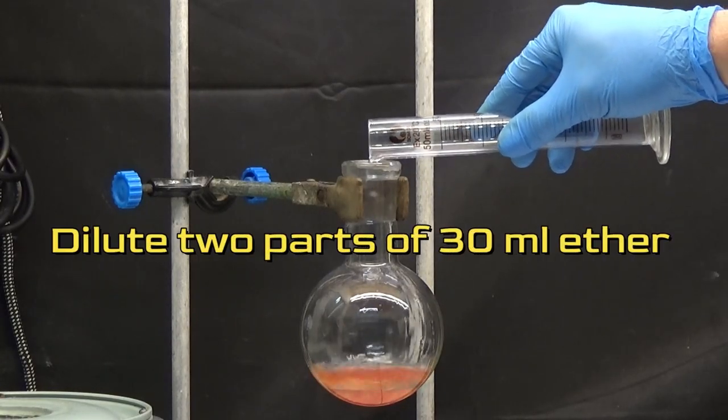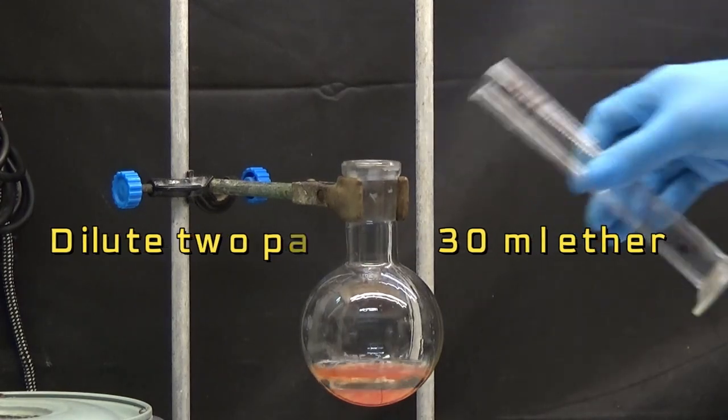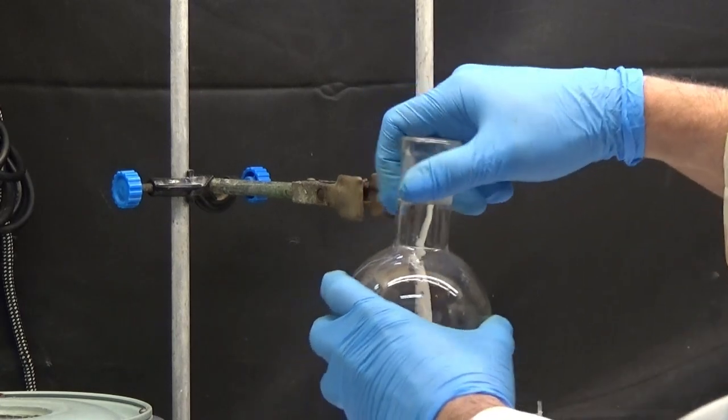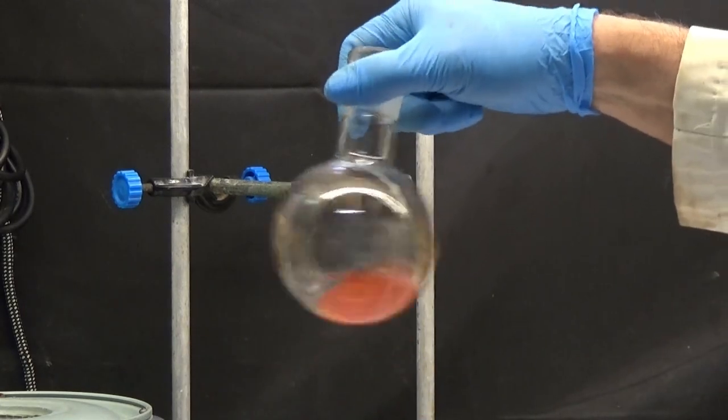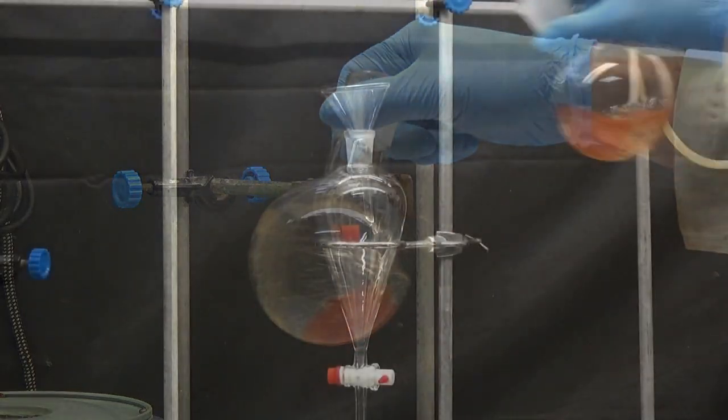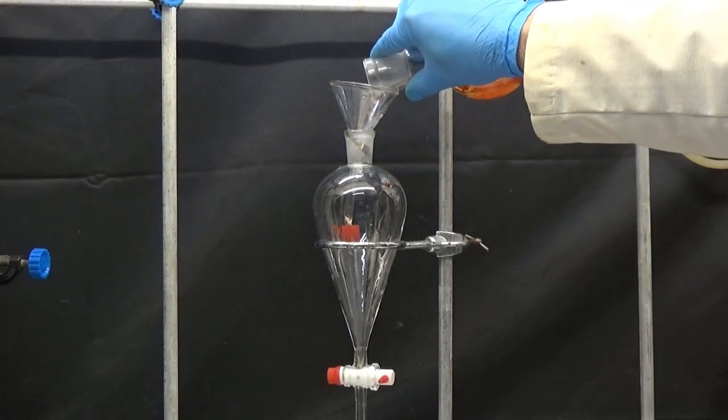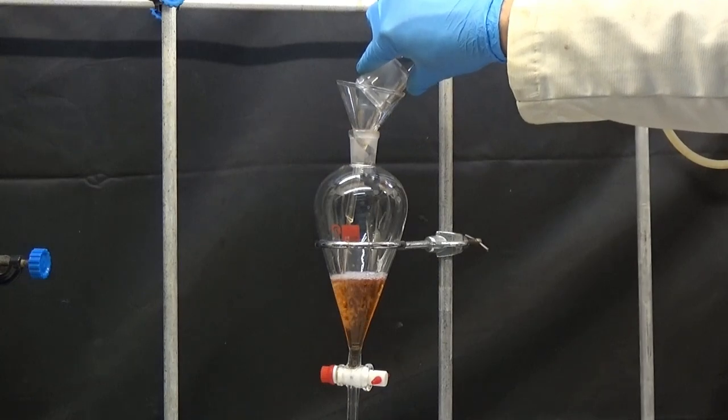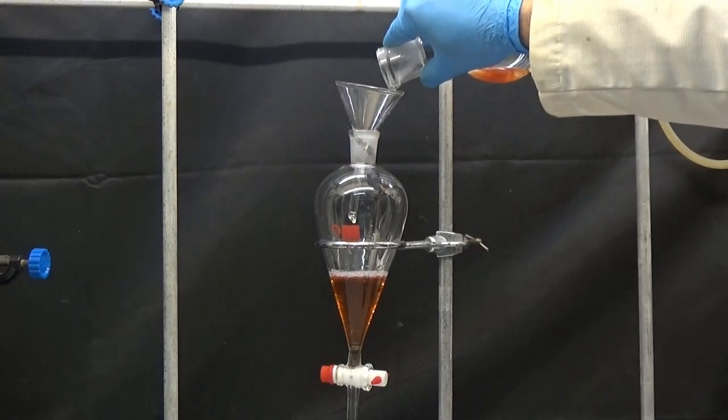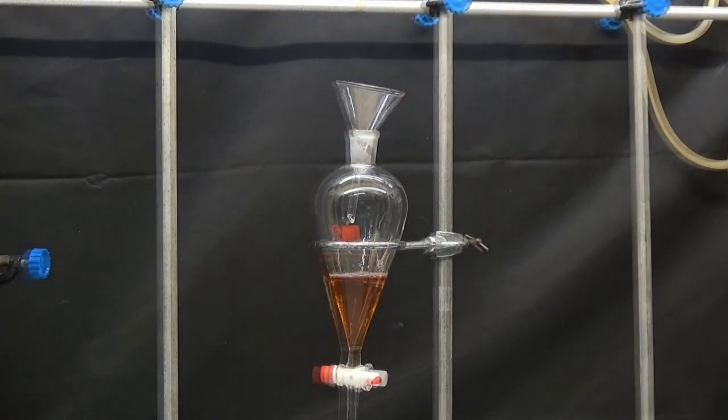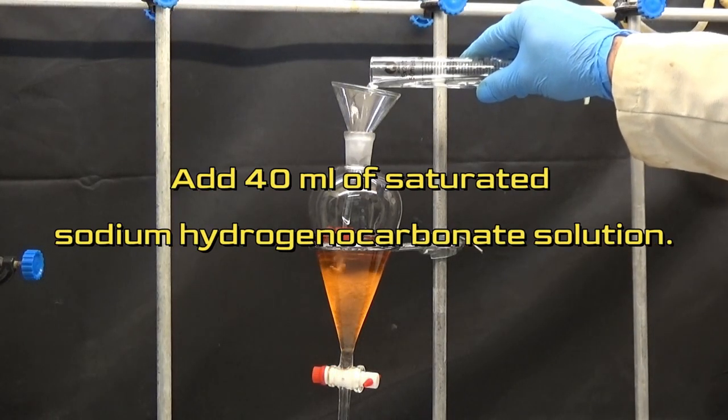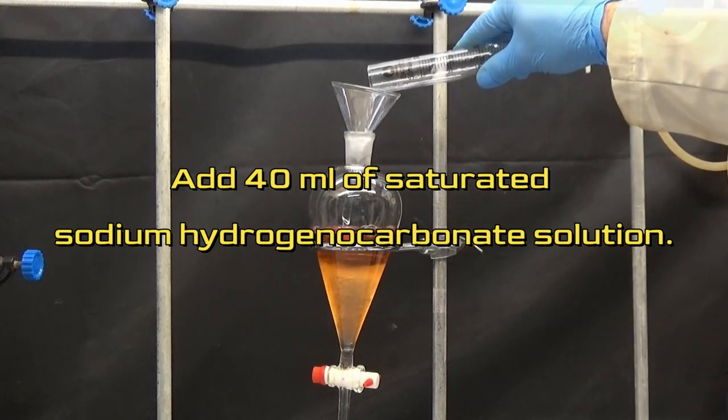Dilute the product with two parts of 30 ml ether and place in a 250 ml separator funnel. Add 40 ml of saturated sodium hydrogenocarbonate solution.